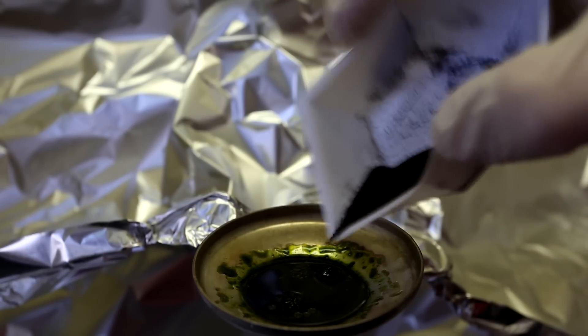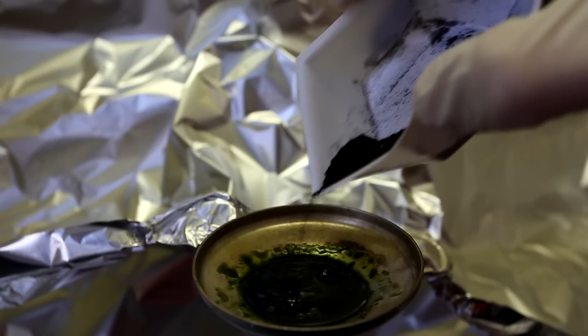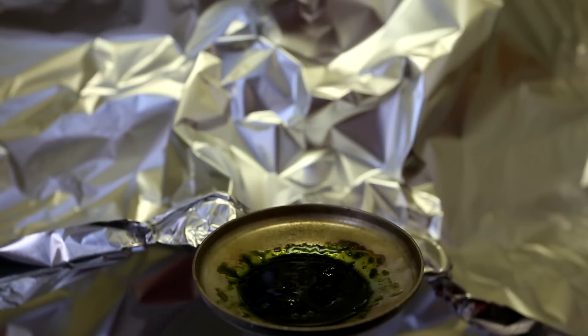The more potassium permanganate that you add, the more manganese heptoxide will be synthesized. However, if you add too much, it will solidify into a solid clump.